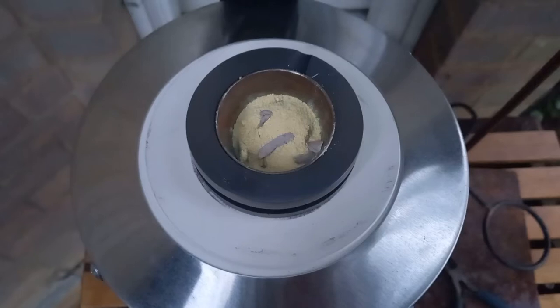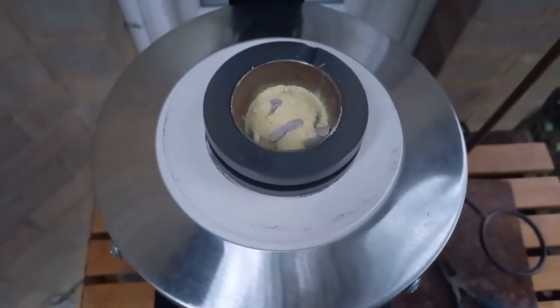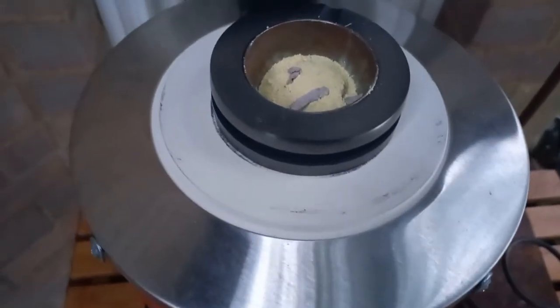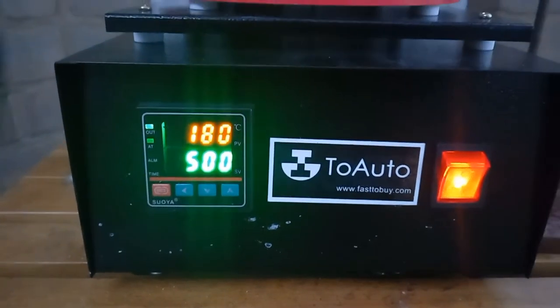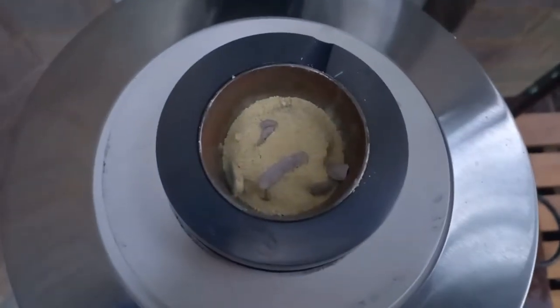I set this for 500 degrees for a start — if it needs more then we'll find out. It's 179 at the moment, 180, so we should get sodium potassium cyanide.